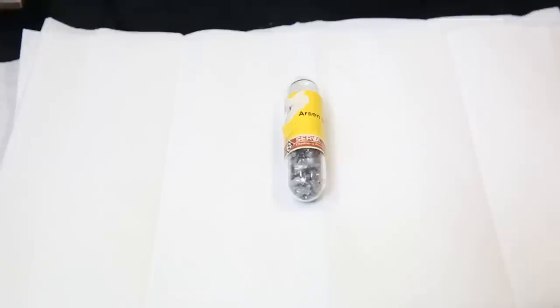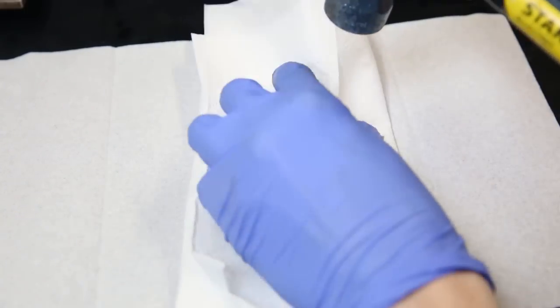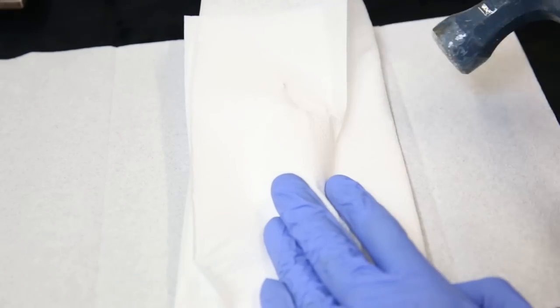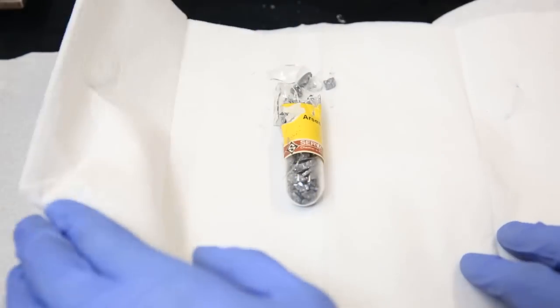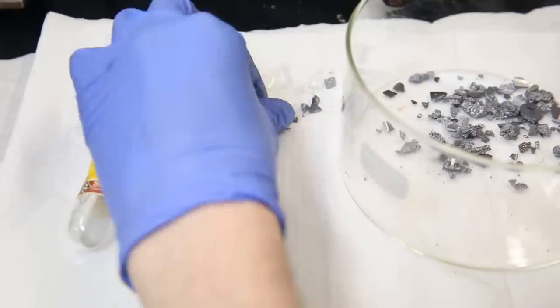Now that the setup is mostly complete, I can break the ampoule containing the arsenic. I don't have a special opener or glass cutter, so I will whip out the hammer once more. I cover the ampoule in some paper towels, and then hit it repeatedly with the hammer to break it. Surprisingly, it took more than one hit to break it. Now the mess is contained to the paper towel, so I can just pour the pieces into a crystallizing dish and pick up the rest.